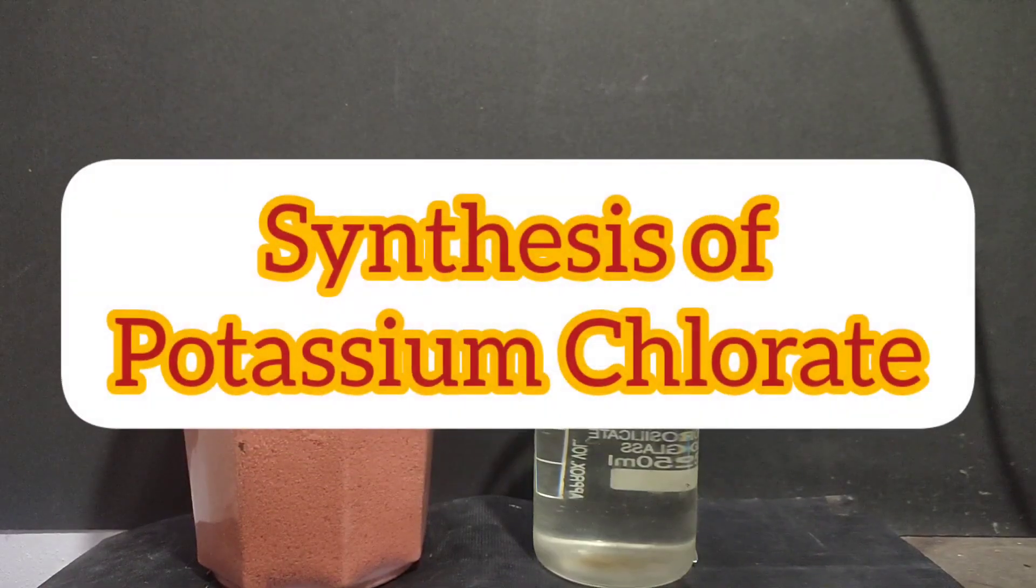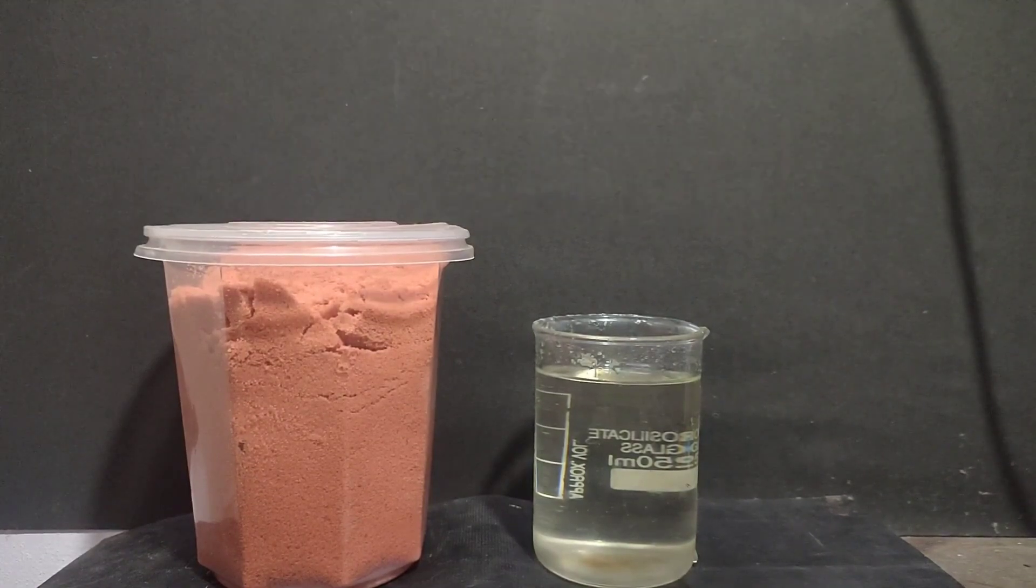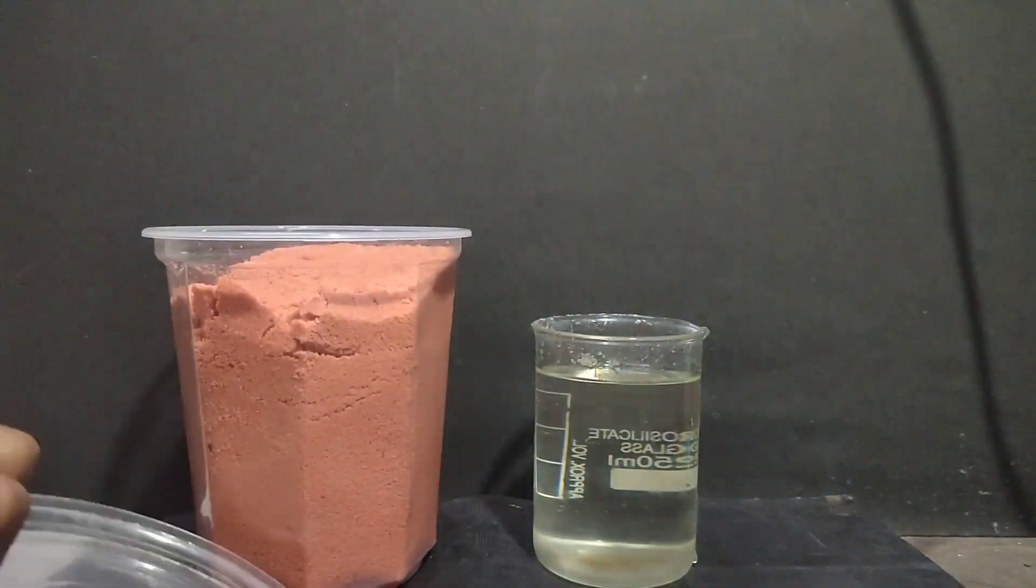In this video I will be making potassium chlorate by electrolysis. On the right I have a saturated solution which I made by dissolving this red colored fertilizer called muriate of potash, or in short MOP.